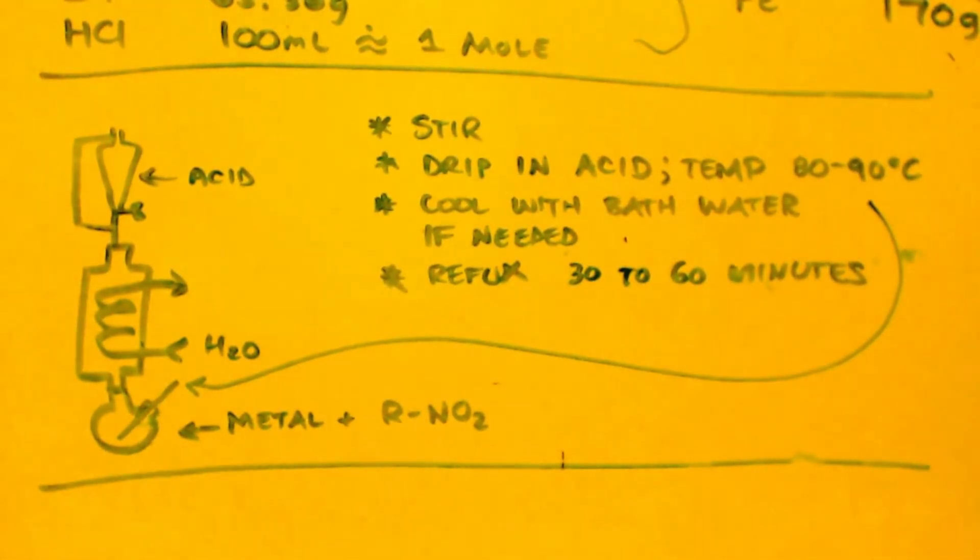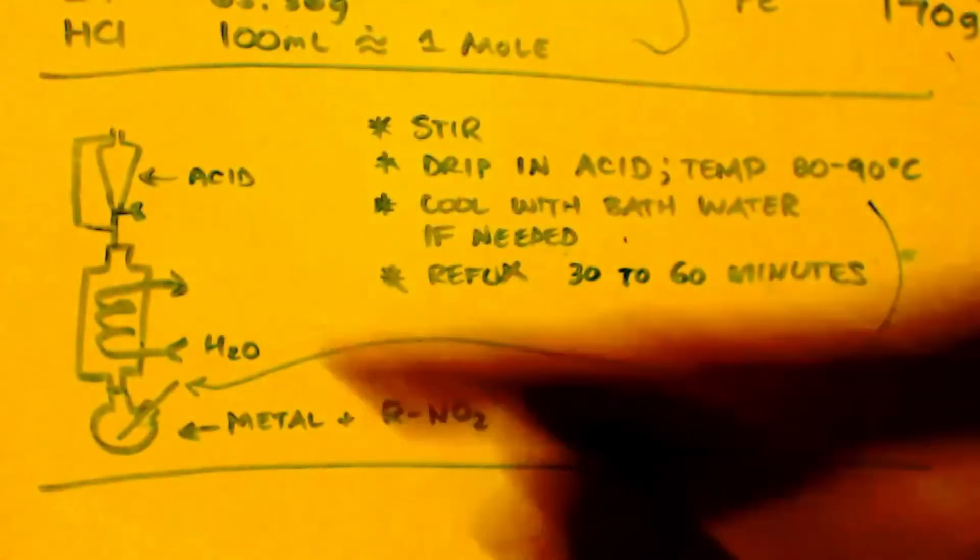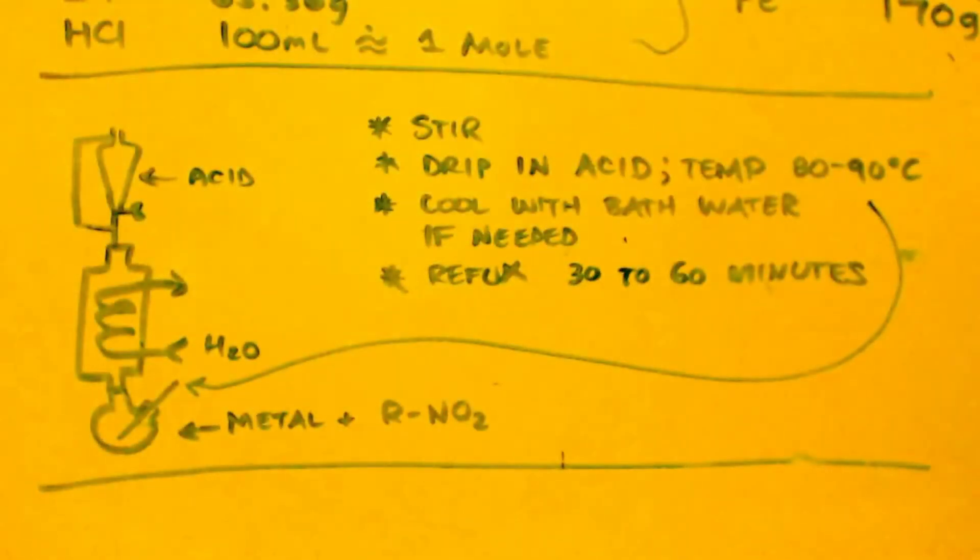And that's basically all you do. You drip it in, and when you're done dripping it in, you take off your equalizing funnel up here. You take it off, and you just start refluxing. Reflux at 30 to 60 minutes. I would say 30, but since I've never done the reaction before, it might be 60. I wouldn't do it more than 60, that's for sure. And that's it, you're done. Now you have your methylamine hydrochloride. The only problem is you got all this salt, all these salts in there too.